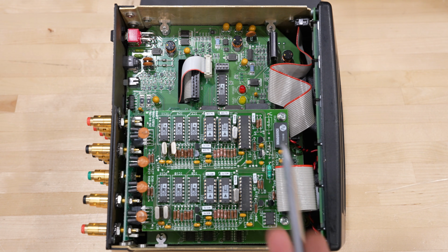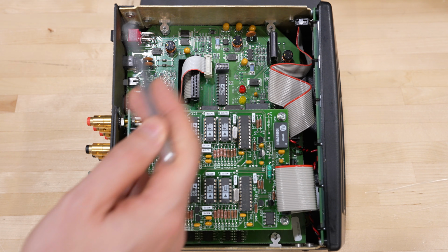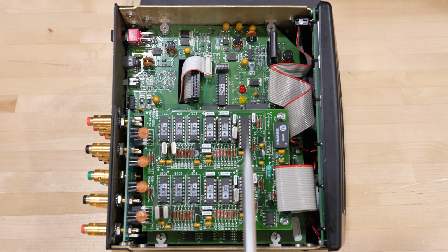So you can see here there's a board at the top, which is connected to 2 of the inputs, and there is a bunch of 0.1% precision resistors over there. In order to really read these resistor values very accurately, you need some precision references in there as well. Underneath this is the digital board and some memories and some EEPROM for processors, and there's an exactly identical board on the other side of this, which then makes up the 4 input channels. There's some power conditioning over here, maybe some voltage regulator, and the cables that go to the front panel. Really simple all through the whole design. So let's take a look at it.